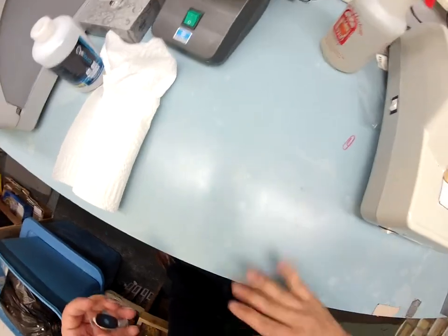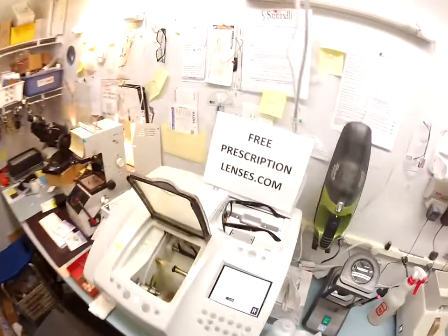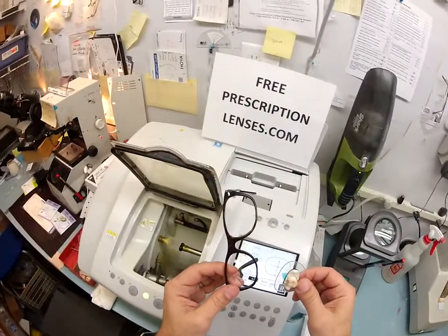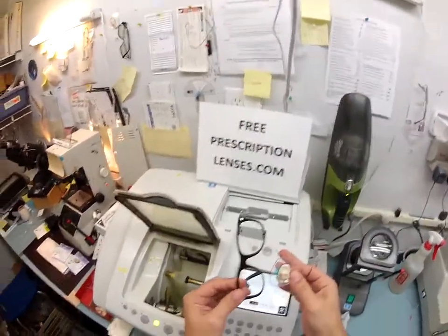All this material that I just scraped off the edge of your lens, I collect it very neatly on the counter and then I wipe it on the floor. This is where I say: kids, stay in school. I went to school for years to learn how to make a mess and wipe stuff on the floor. Don't think you can do it as easily as me on day one — stay in school, learn to do what I do, then you can make a mess.